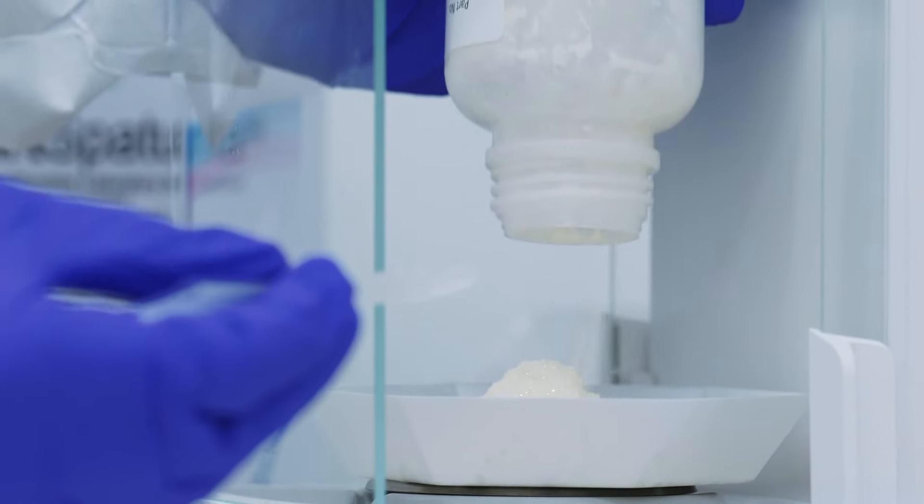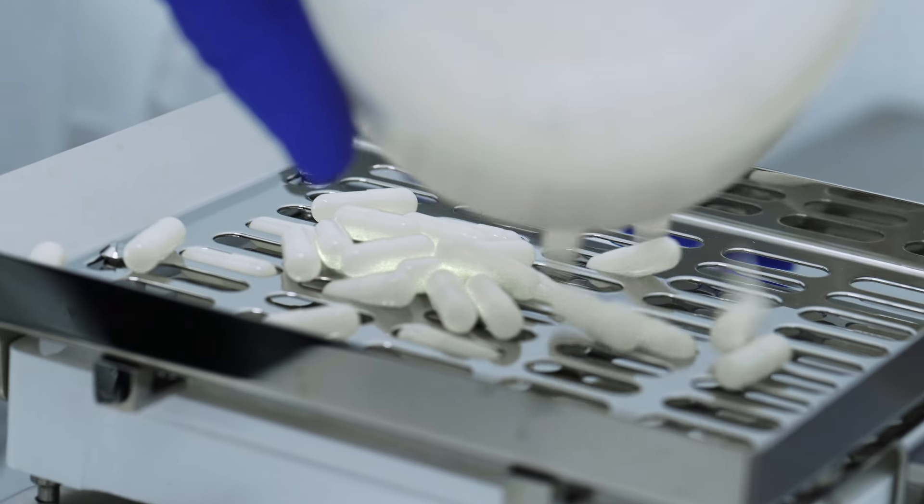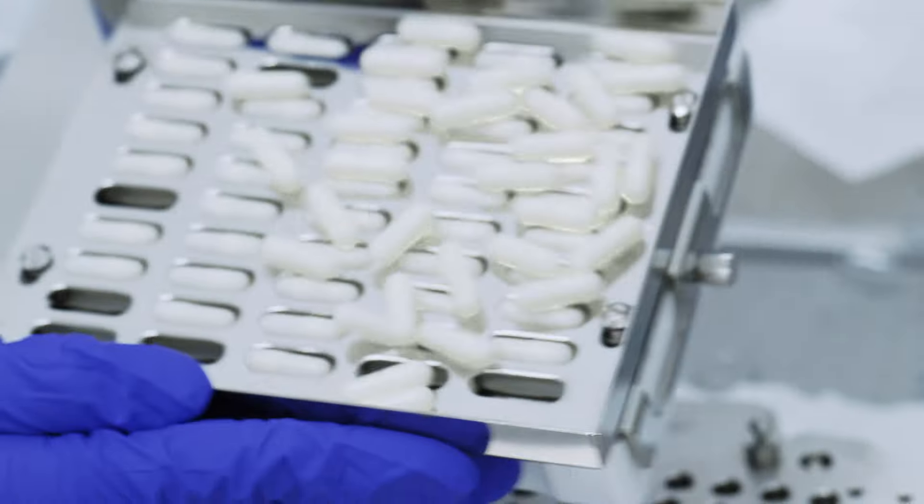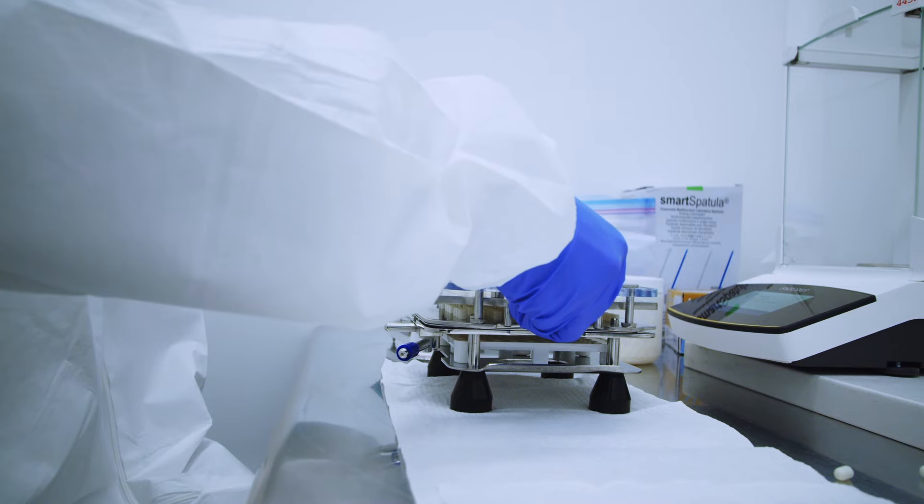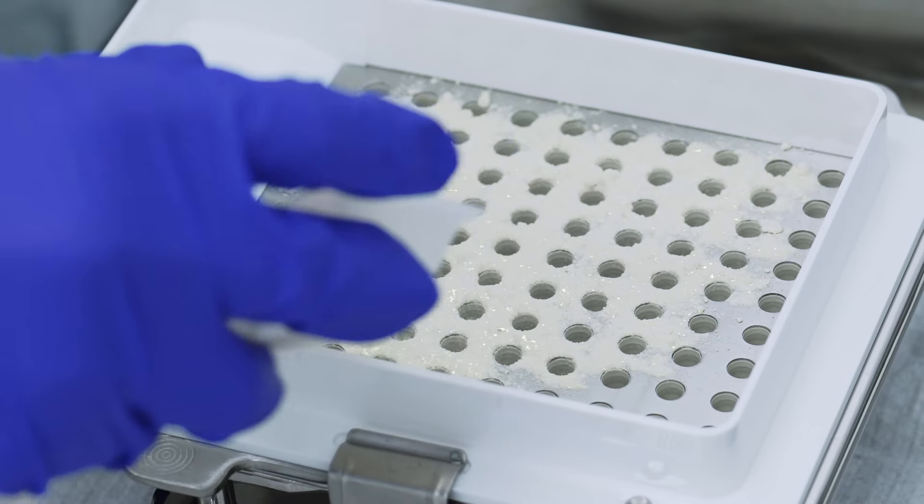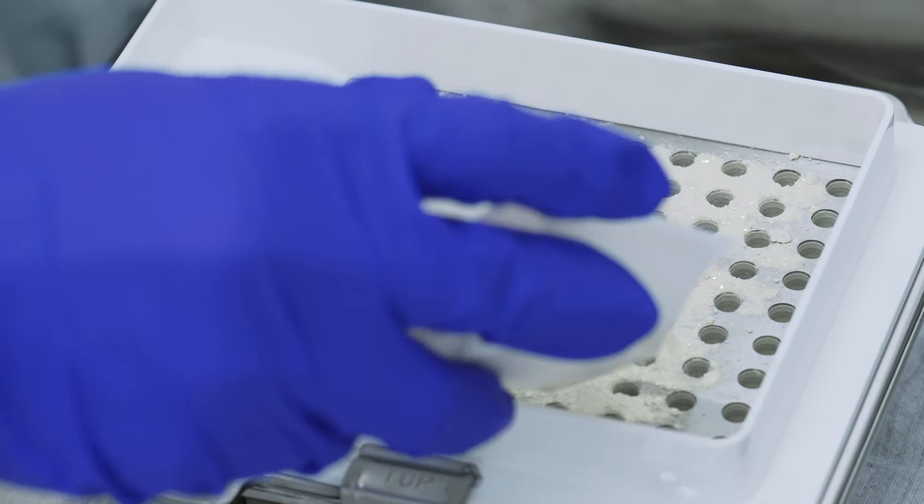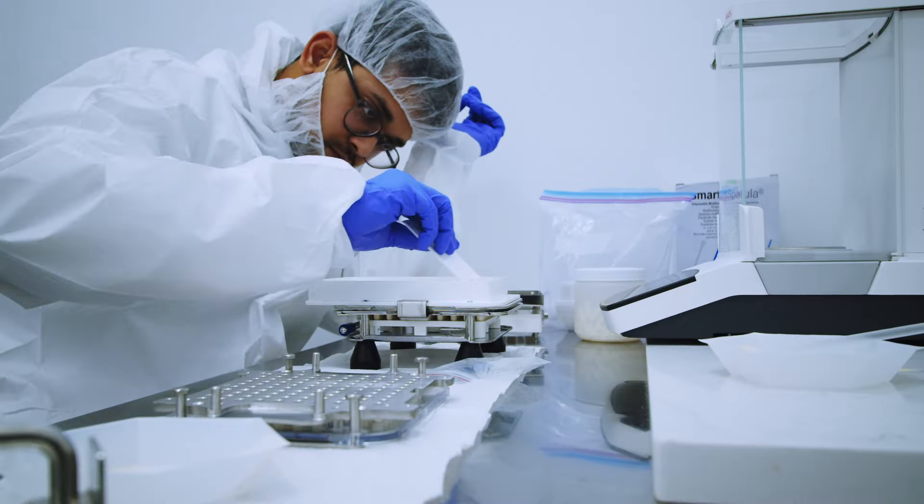Currently we are going to be filling capsules by hand. We have a piece of apparatus that allows us to fill 100 capsules at a time. It's done in a way that allows us to ensure that the material is evenly distributed throughout all the capsules, along with the perfectly blended mixture, allowing us to calculate the dosage exactly as we want it to be.